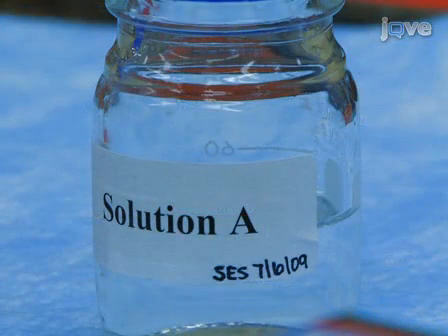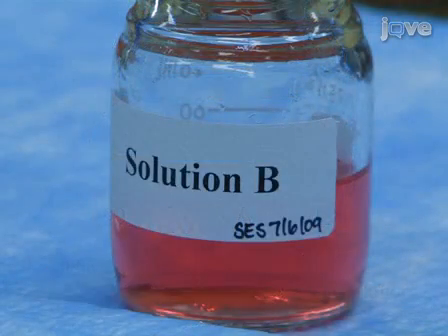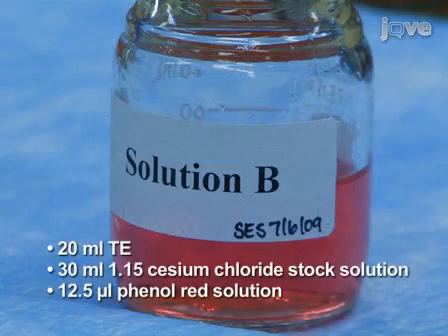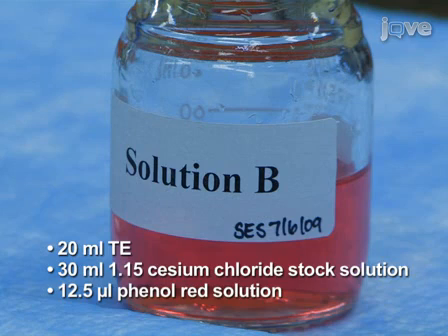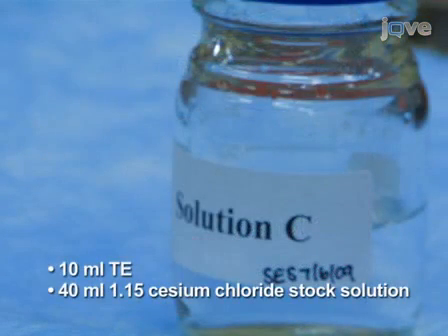Solution A is made by mixing 30 ml of TE with 20 ml of 1.15 cesium chloride stock solution. Solution B is made by mixing 20 ml of TE with 30 ml of 1.15 cesium chloride stock solution, and then adding 12.5 microliters of phenol red solution. Finally, solution C is made by mixing 10 ml of TE with 40 ml of 1.15 cesium chloride solution.